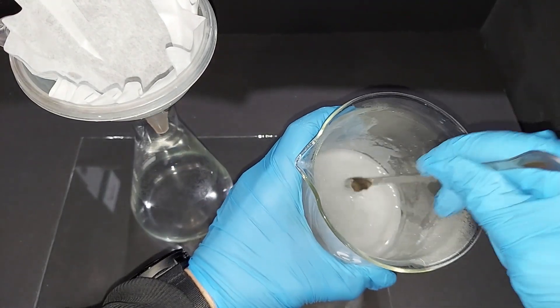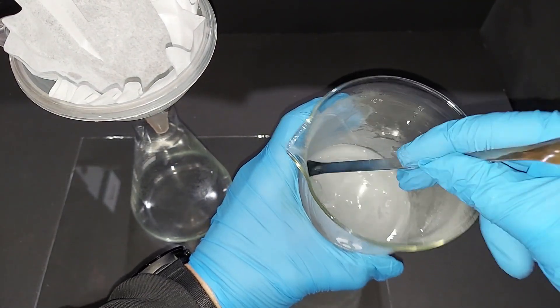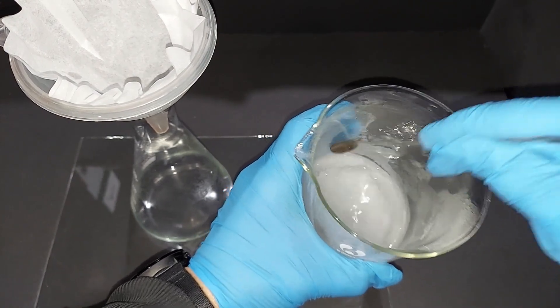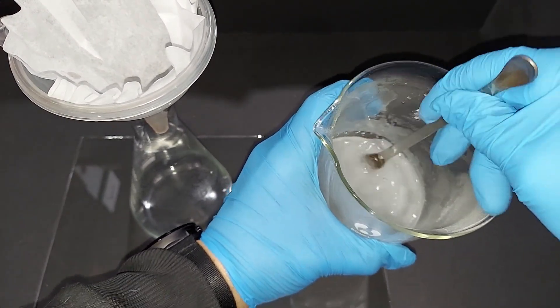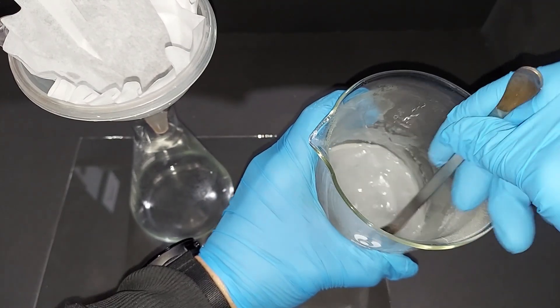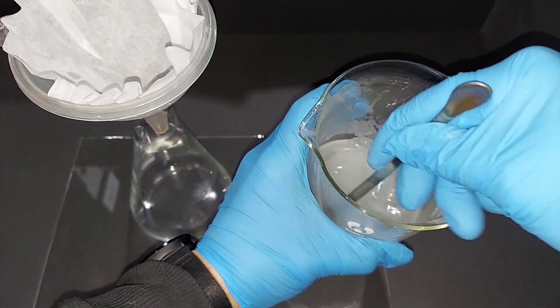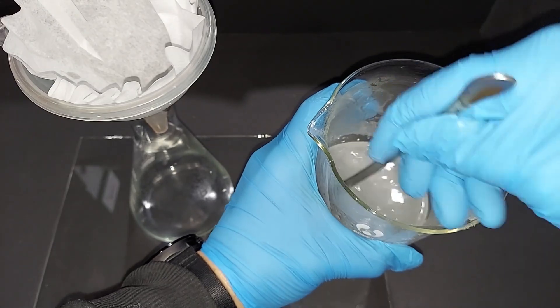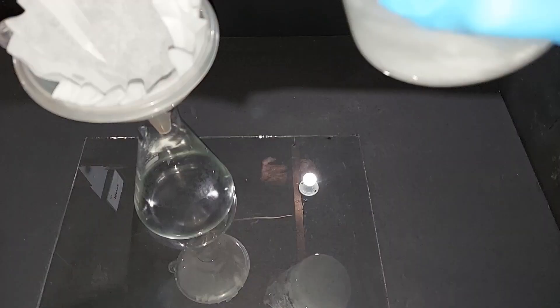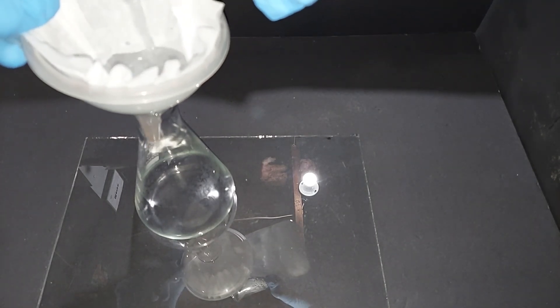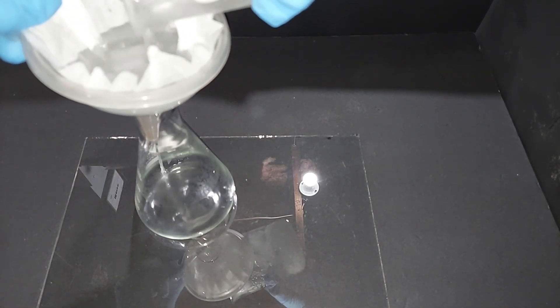So I might have left this in a little bit too long because most of the liquid is now water. There might be some ice in here actually, but that's not a big deal. I'm just gonna scrape this stuff off. Kind of messed up the crystals. I'm not worried about that. And for our last part here, finally.